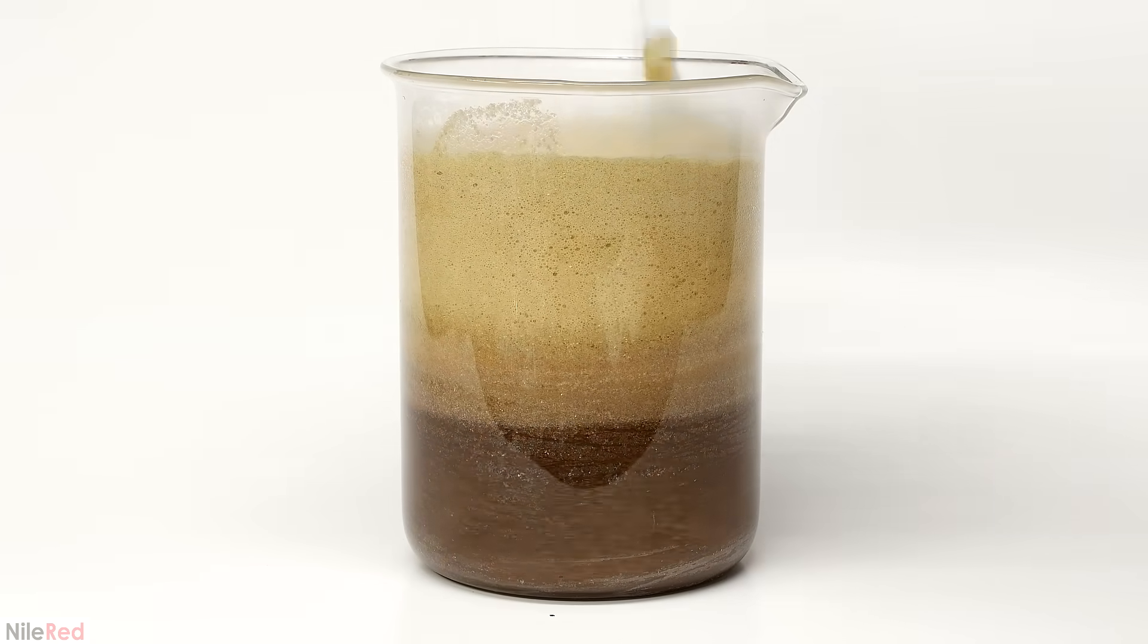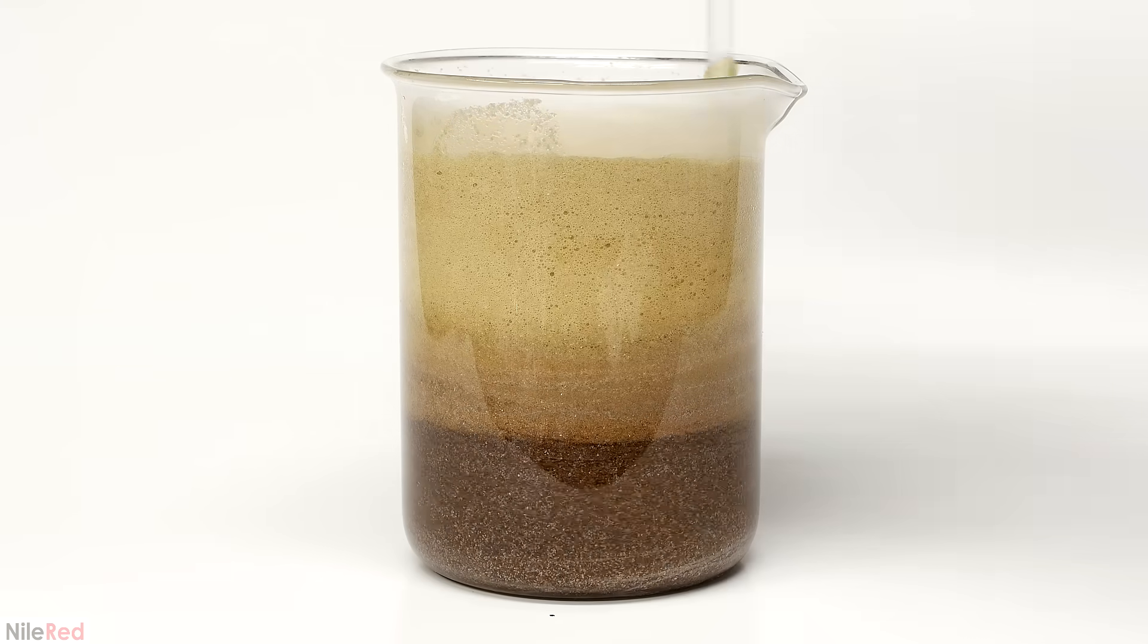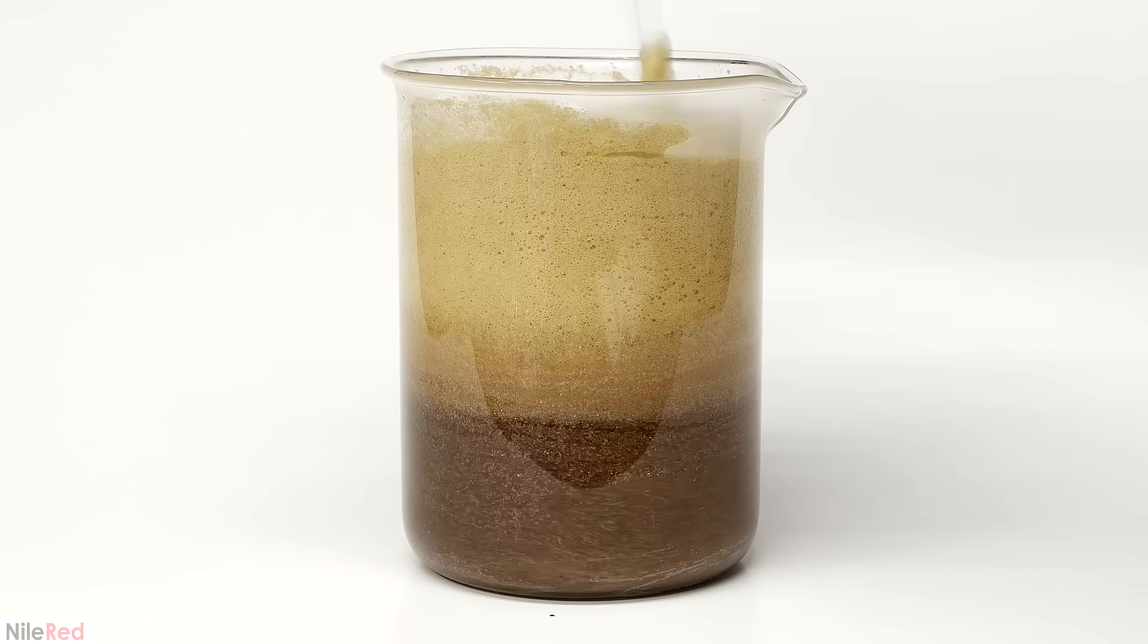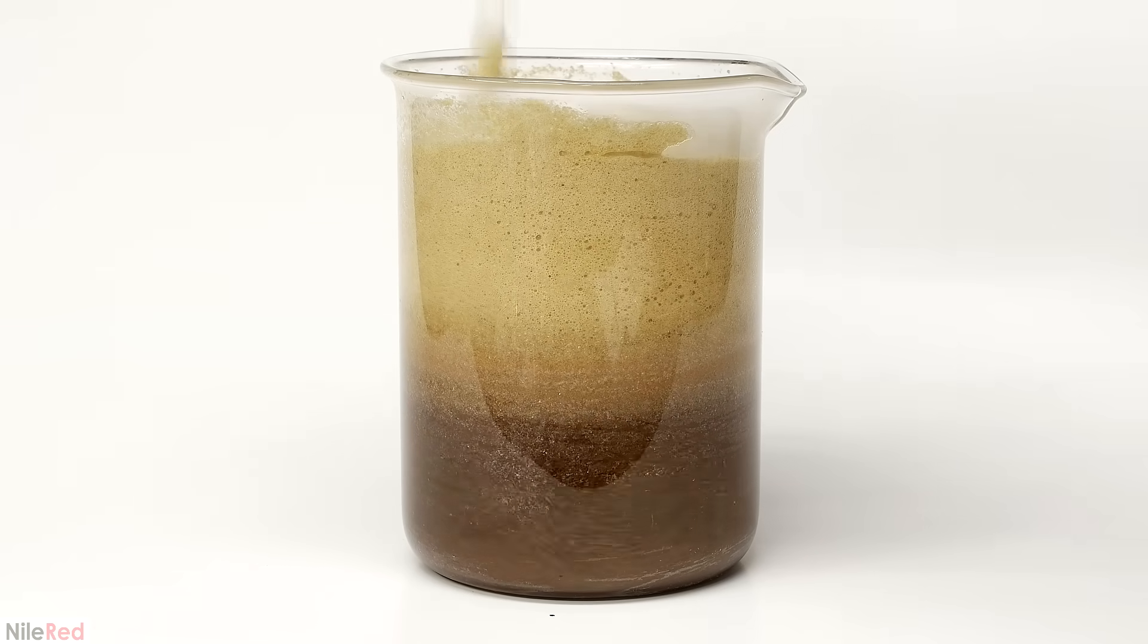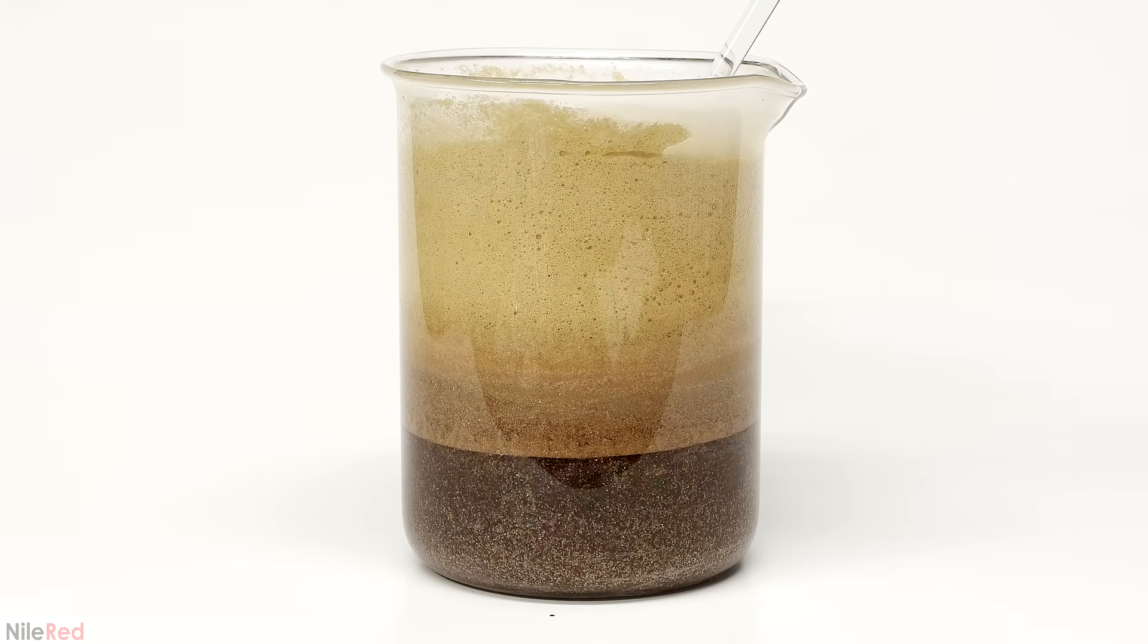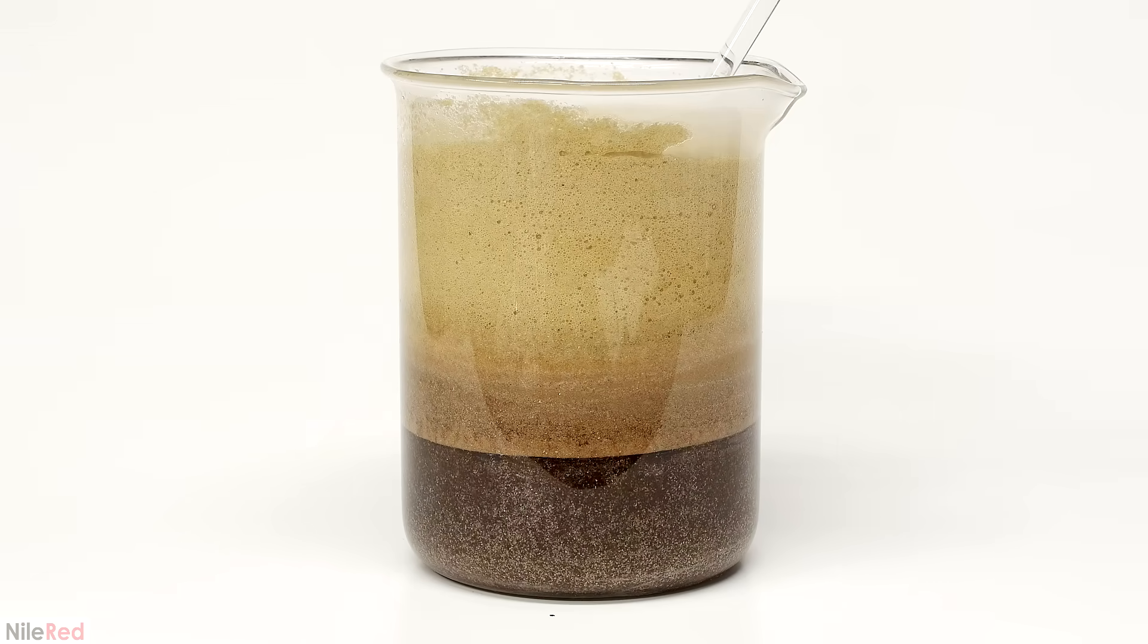I continue mixing it for a few minutes, then cover it with some plastic and put it in the fridge for a couple hours. At this point, it still really stinks though, so I tried triple bagging it to save my fridge. The smell still leaked out a little, but it wasn't too horrible.